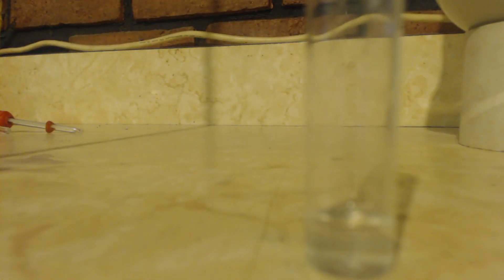It's a little test tube. There's my finger so you can see it's a small test tube. And I'm going to pour some azeotropic ethanol in there. I'm going to try and dissolve that. So what I'm going to do is take a sample, a little sample of that silver nitrate ethanol. And I'm going to take a sample out of the reaction pot. And I'm going to put it in there. Shake it around. Wow, I see very little precip. You can see it's cloudy. You can see on the left, it's clear. And on the right, it's got some kind of precip now.